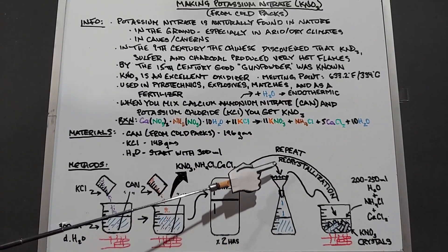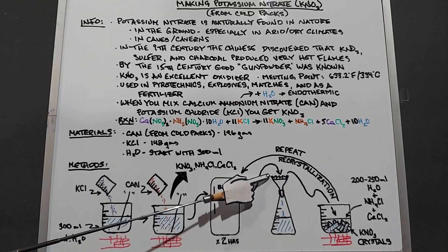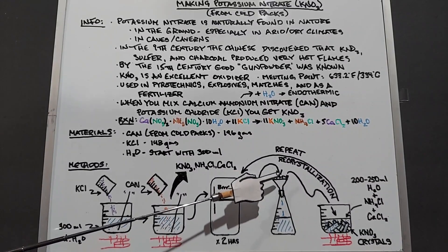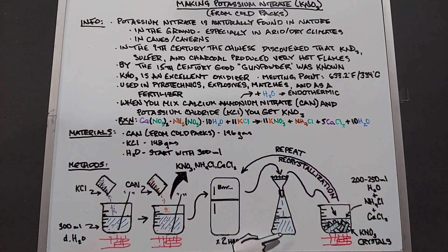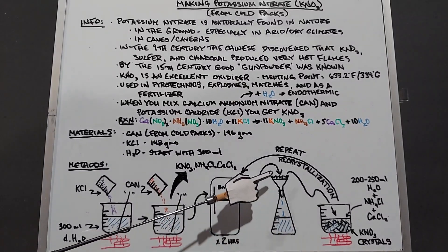You want to save the solid. The solid is going to be mostly potassium nitrate, but in the mix of that will be some trapped ammonia chloride and calcium chloride. Down here you'll have mostly ammonia chloride and calcium chloride in the solution, but there will be small amounts of potassium nitrate that you lose.